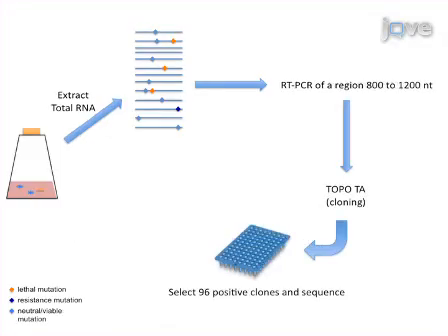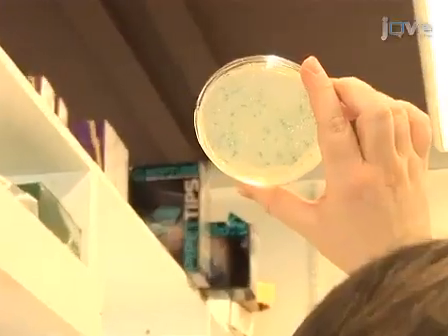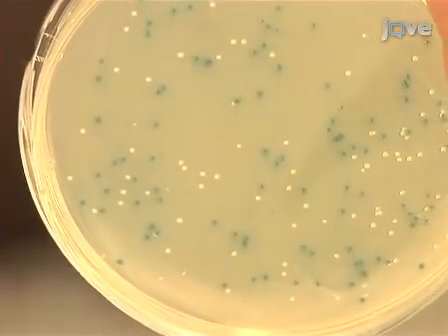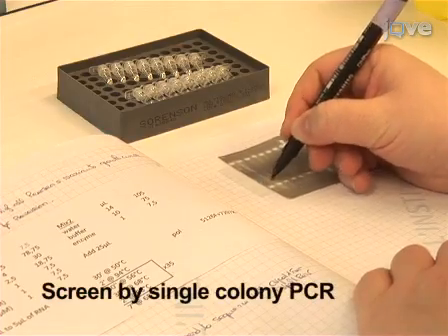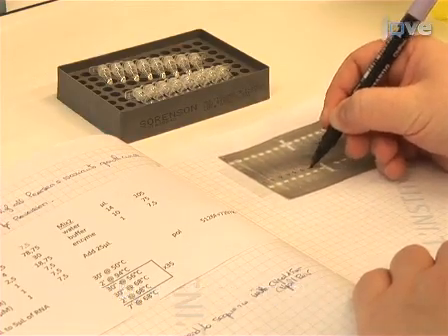Next, topo-TA clone the purified product for each virus population to be studied. Select 96 colonies identified as having a positive insert by blue-white screening on XGAL-coated plates. Perform single colony PCR to confirm the validity of blue-white screening. Using the fragment size and conditions above, about 90% of the colonies should be positive.